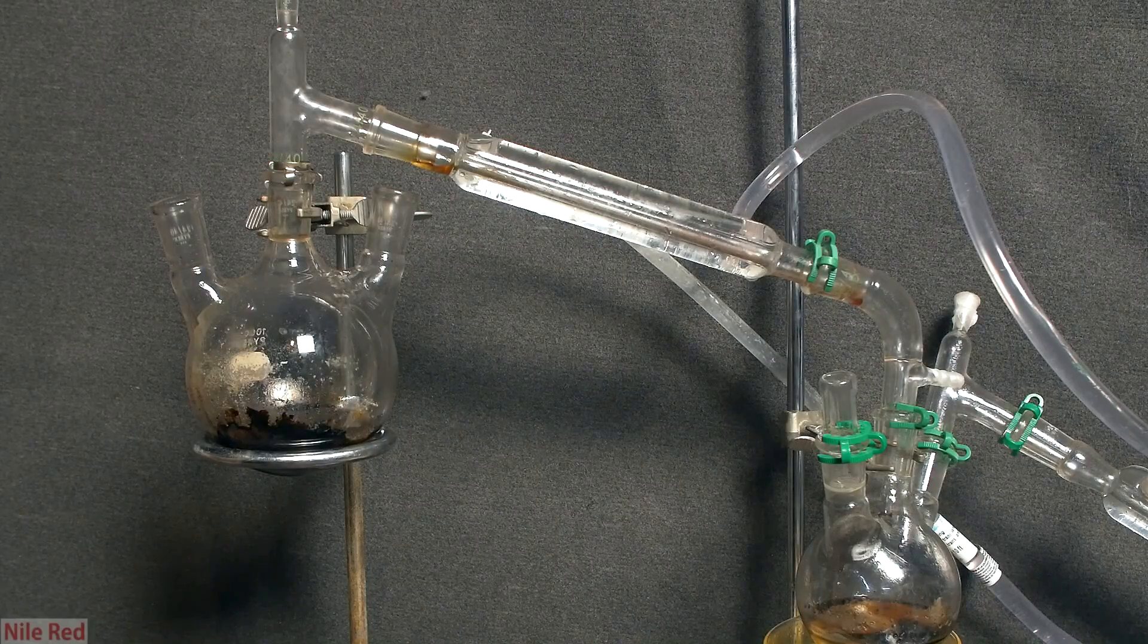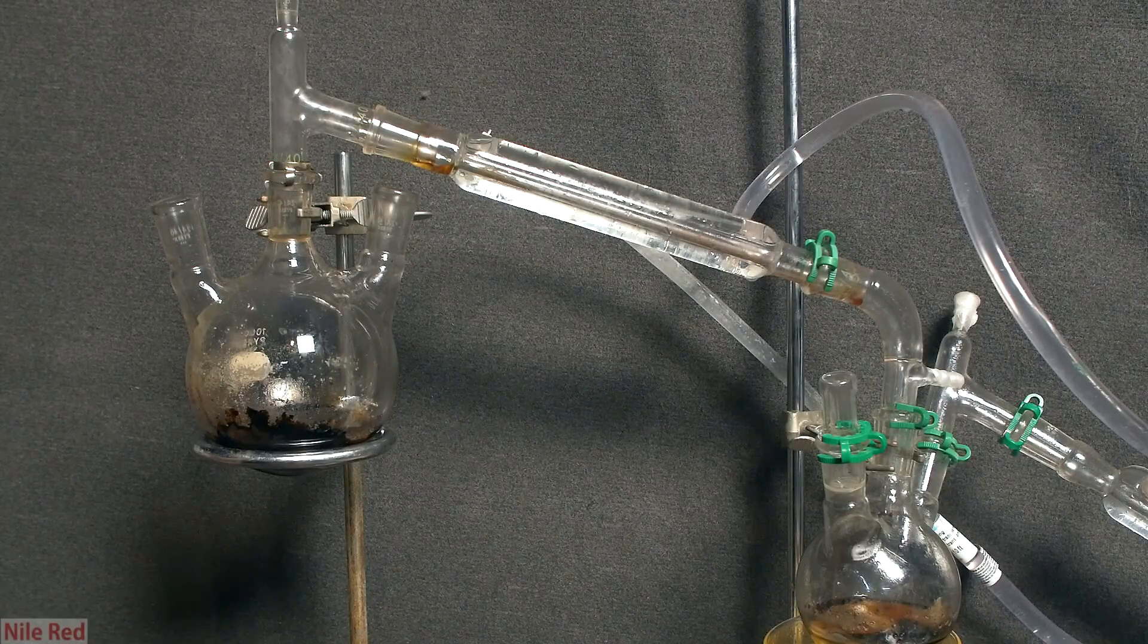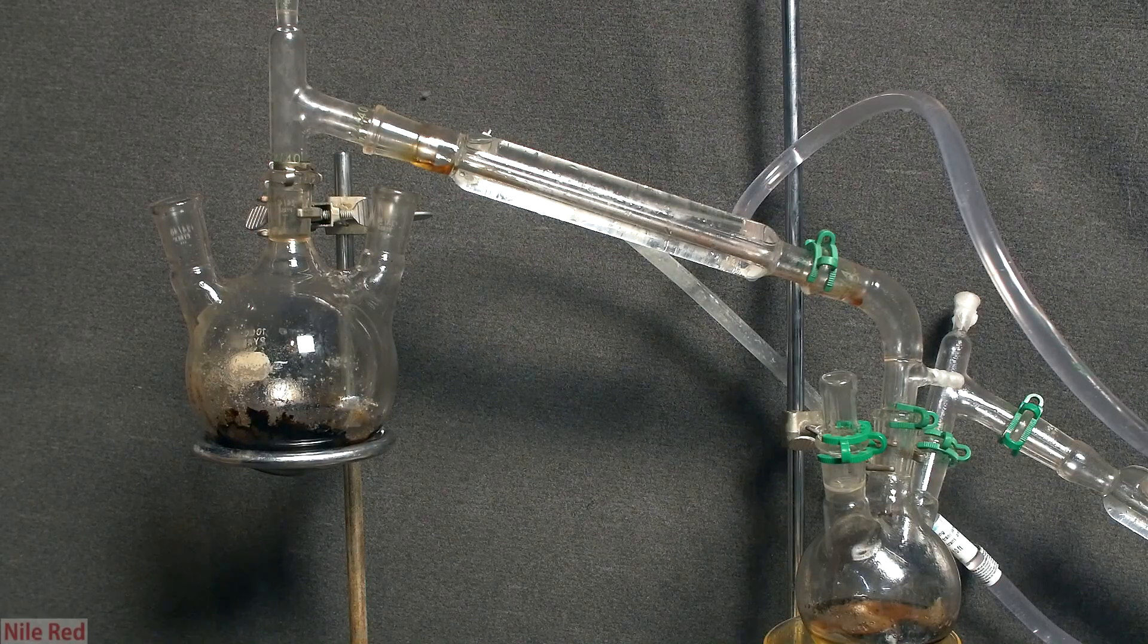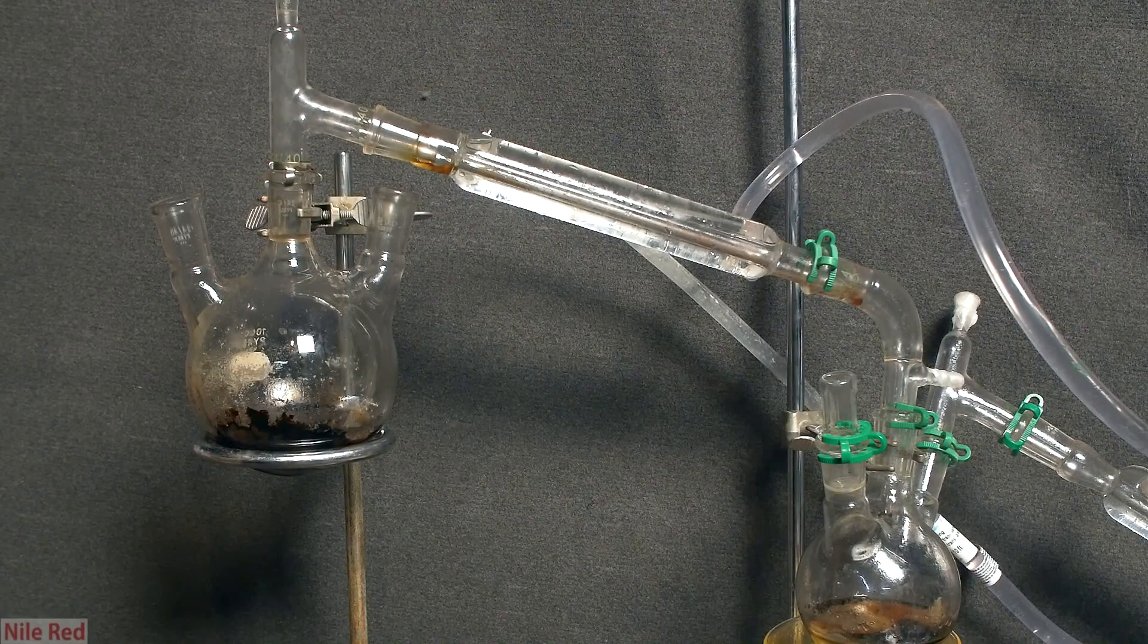Anyway, now I want to talk about how I cleaned all of my glassware. After each distillation, the first thing that I did was I left all of my glassware open to air and light, so that all of the acrolein could polymerize.